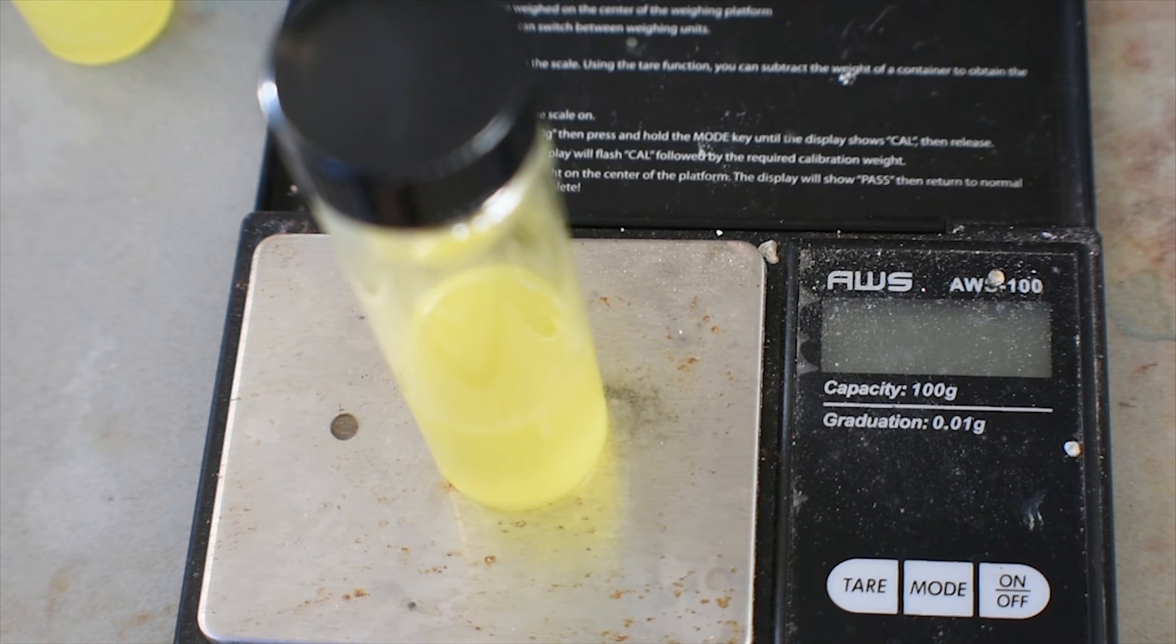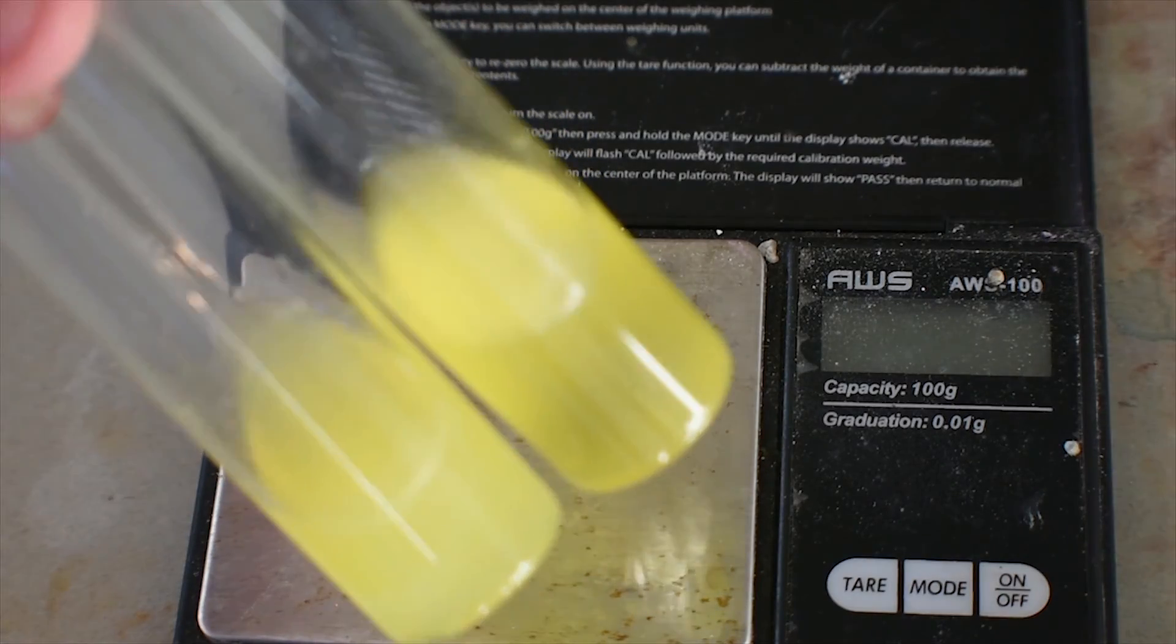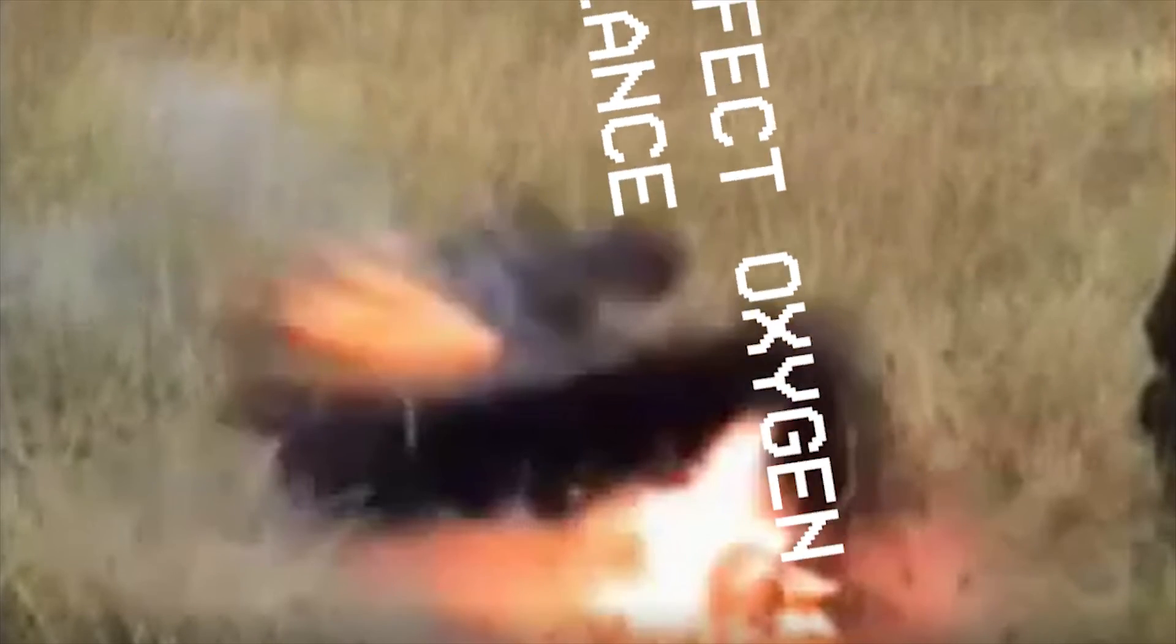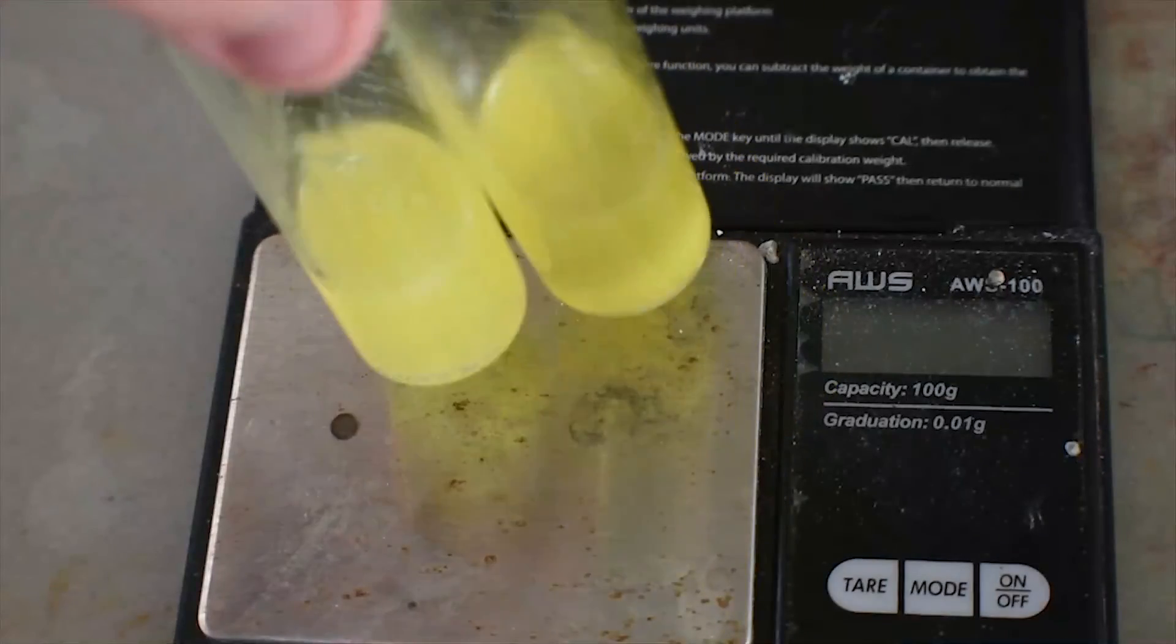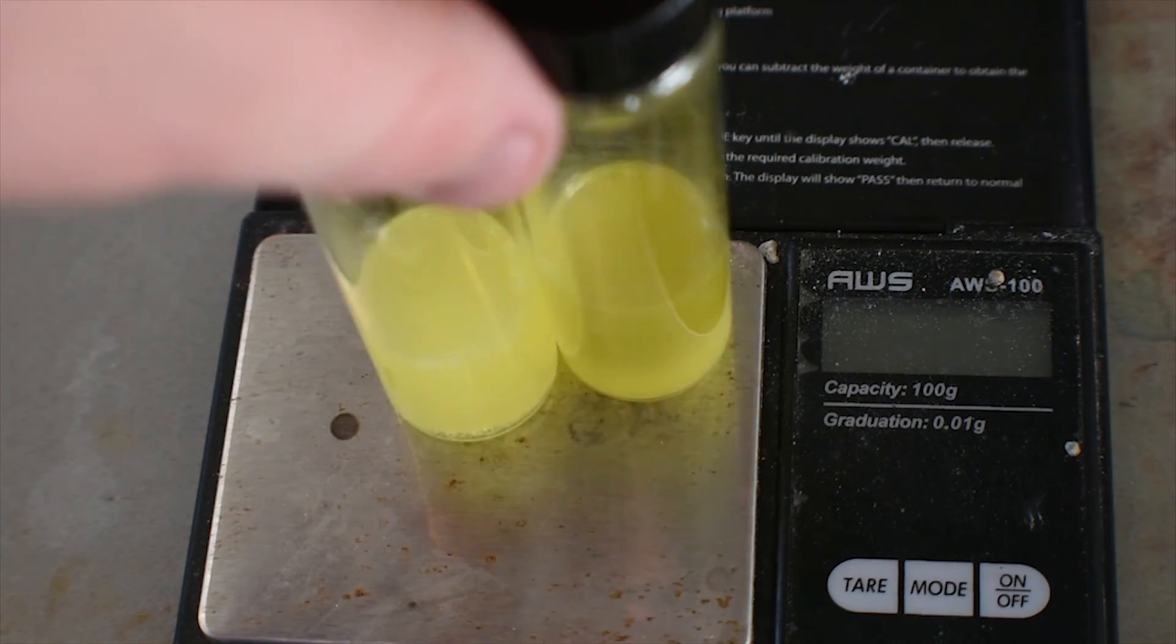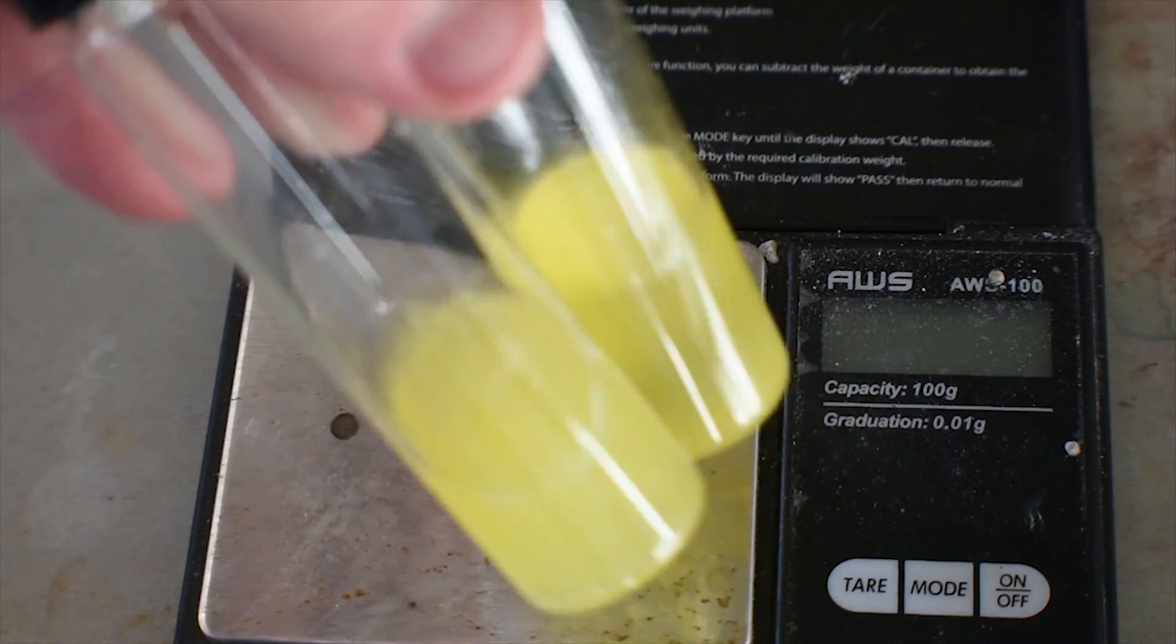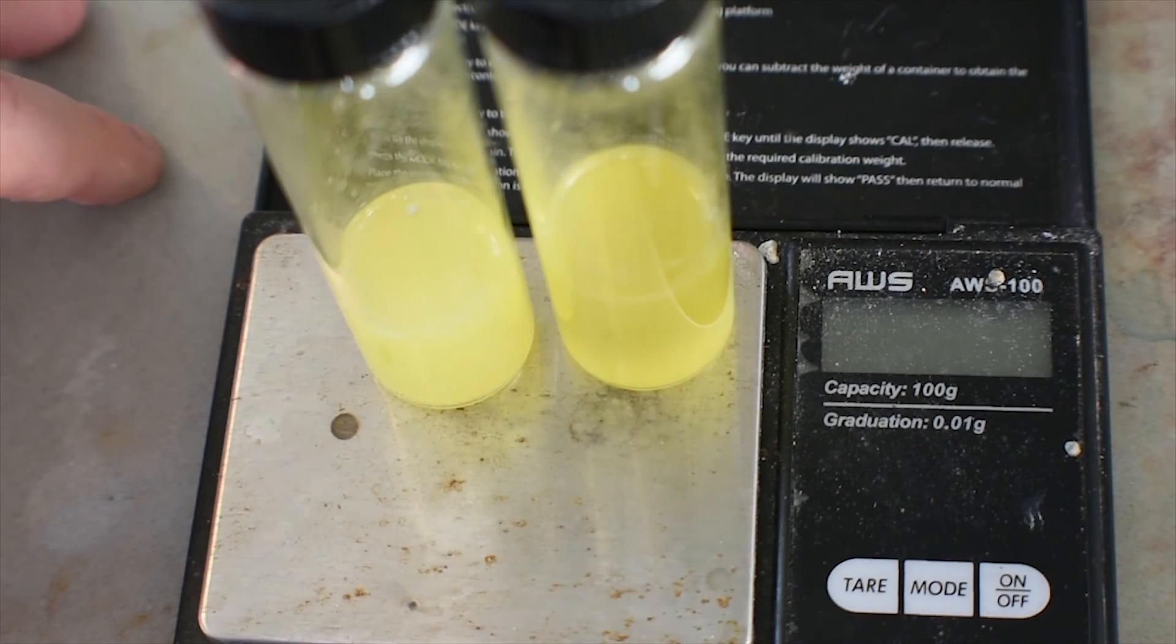I have no idea what I'm going to do with this. Apparently it's explosive. Not very well, but it's basically the definition of oxygen-balanced negative, as you can see in this video. Somebody come and look at this. Oh shit, what is that? Yeah, not too good. It looks a lot more vibrant and yellow in real life than it does on camera. The camera kind of washes out the colors, I don't know why. But, yeah. Super stinky, super lacrimatory, mildly explosive tetrachloroethylene diamine. About 28 grams of it from two runs. I have no idea what percent yield that is, but it's pretty good.